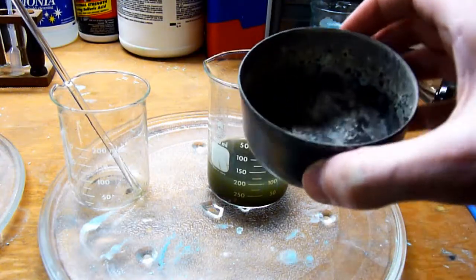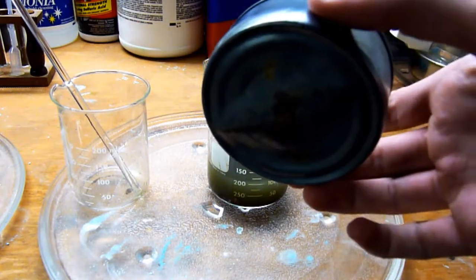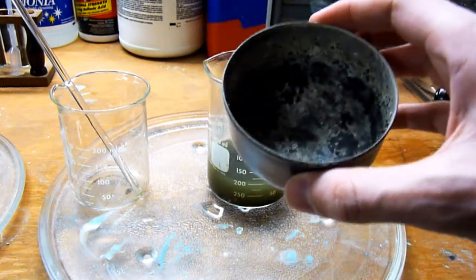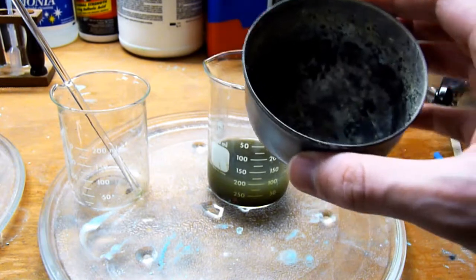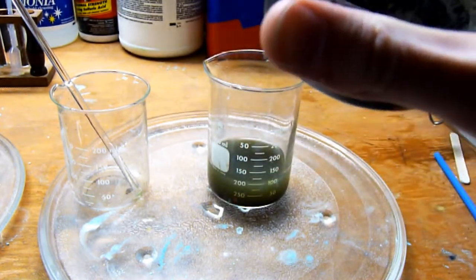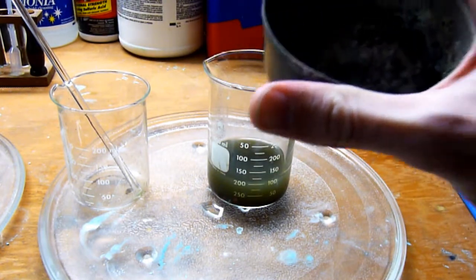This is the can that the thermite was set off in. As you can see it's severely warped from the heat. But the reaction should have produced pure copper metal. Well, impure copper metal I should say.